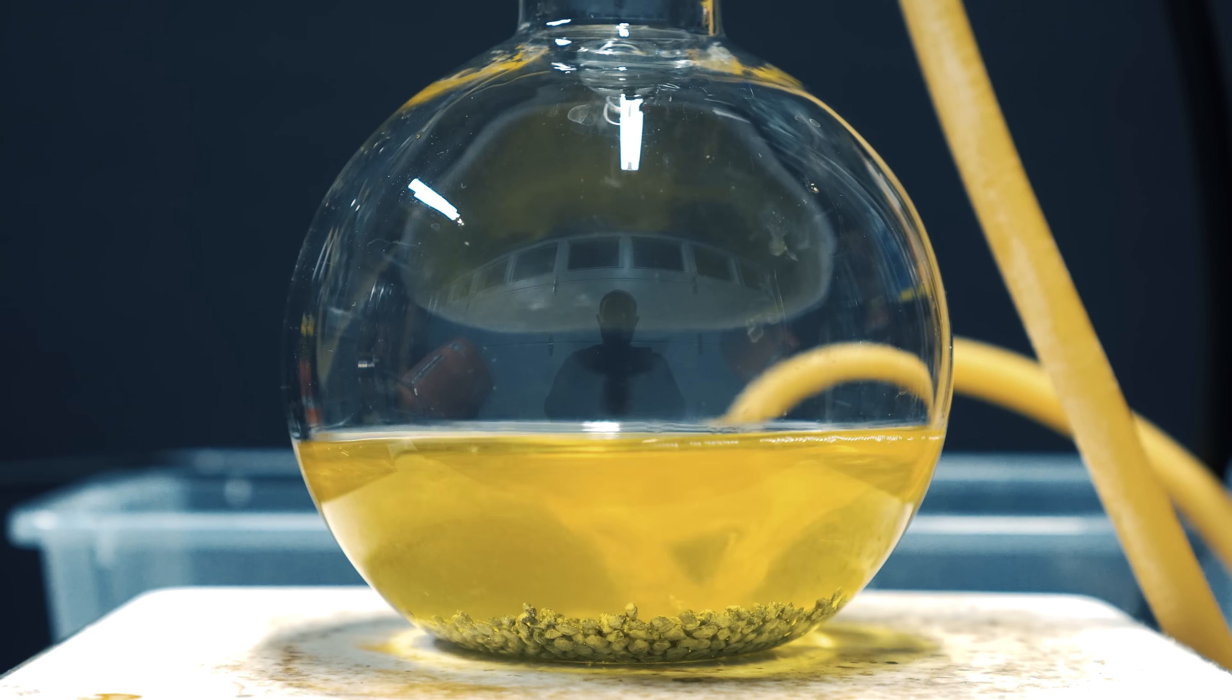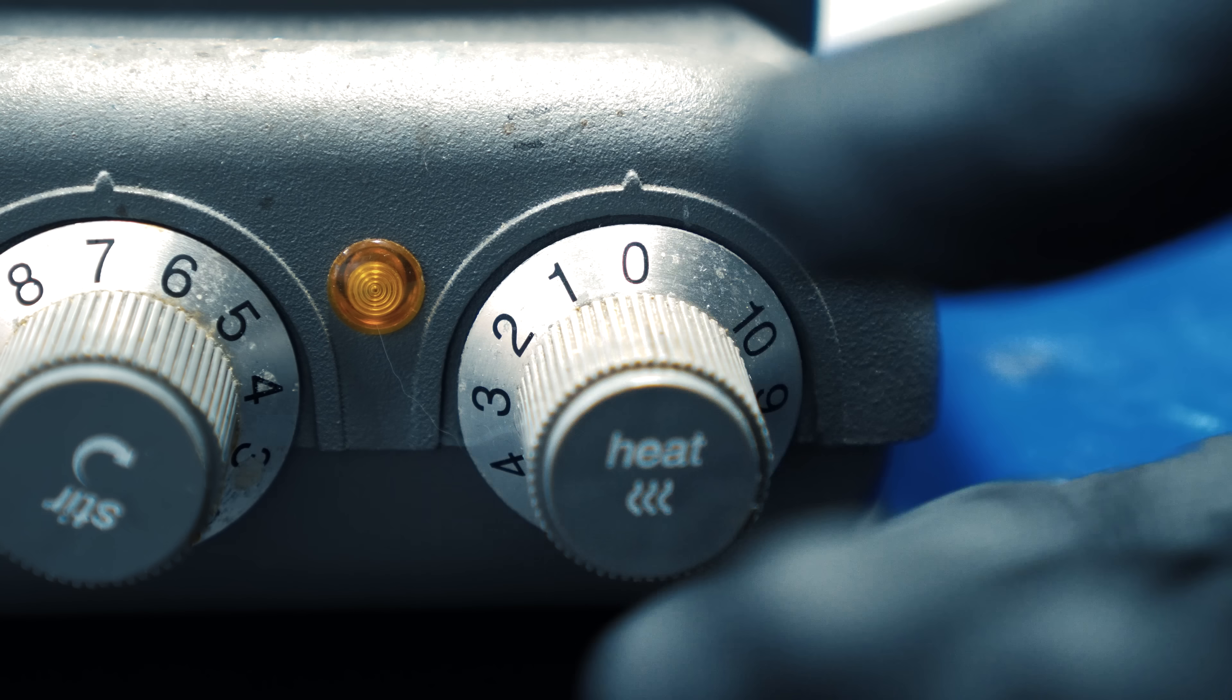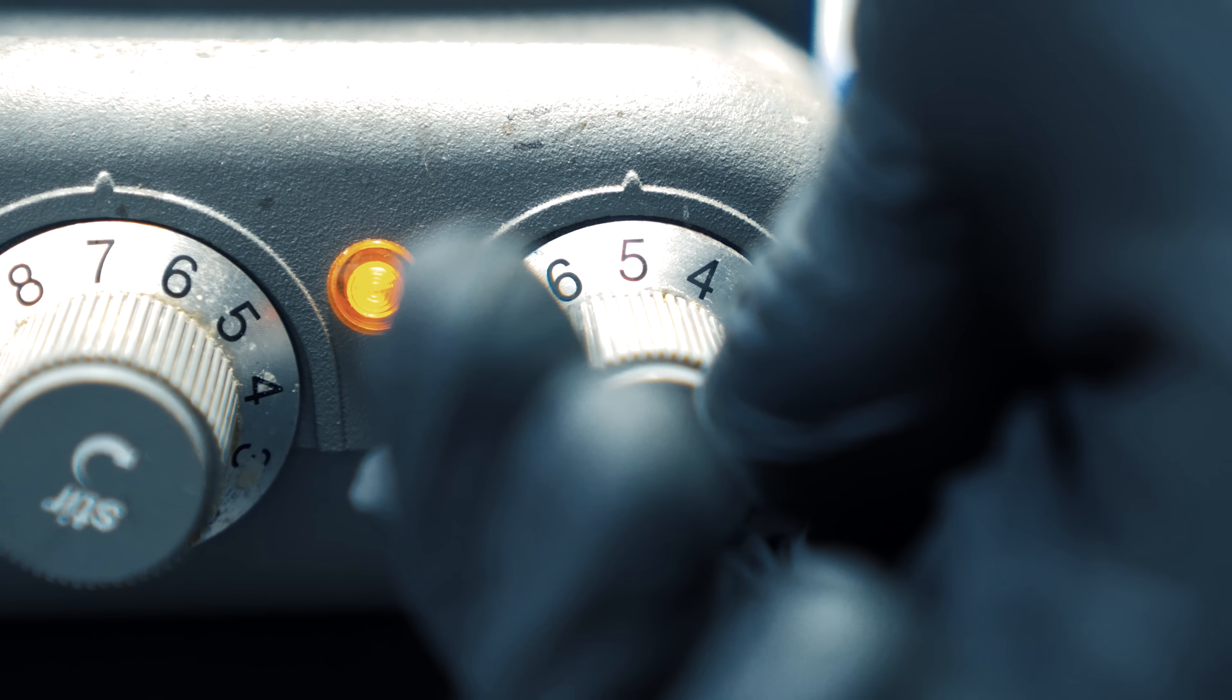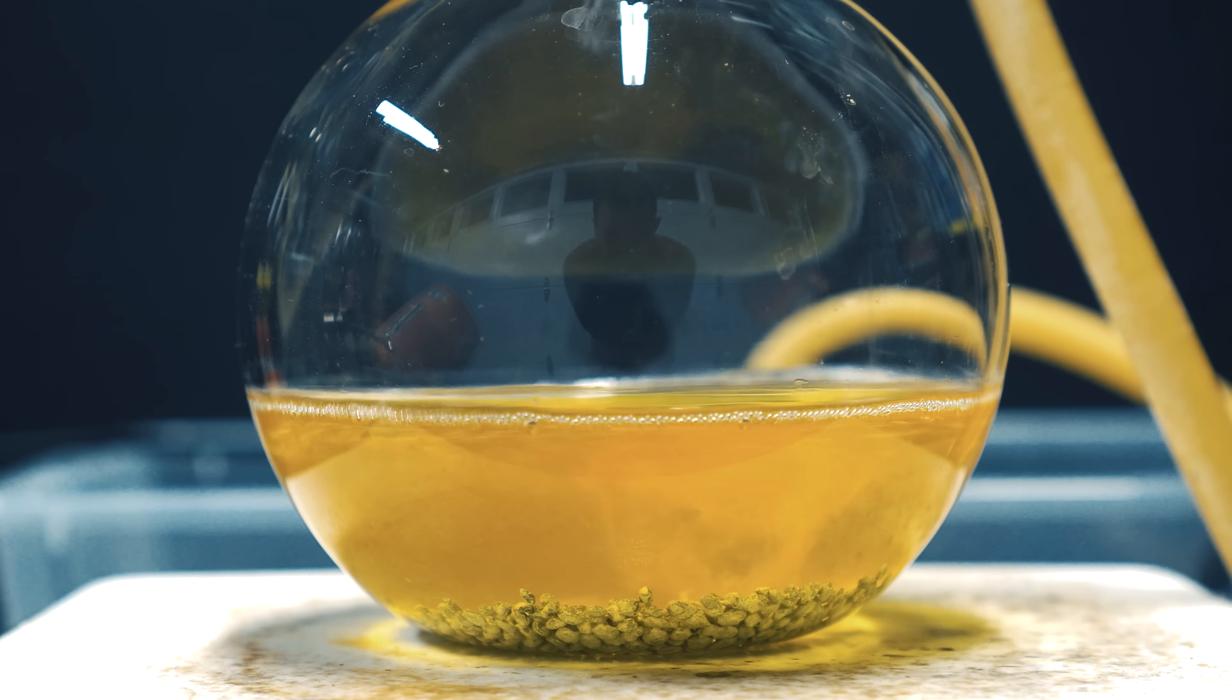It's now time for me to turn on heating, and I'm just going to bring it up to a constant reflux. As the solution was heating up, the reaction mixture actually turned a little bit orange, and eventually it turned almost red.